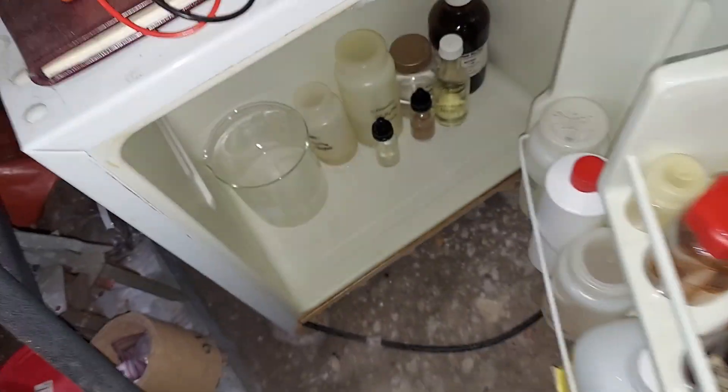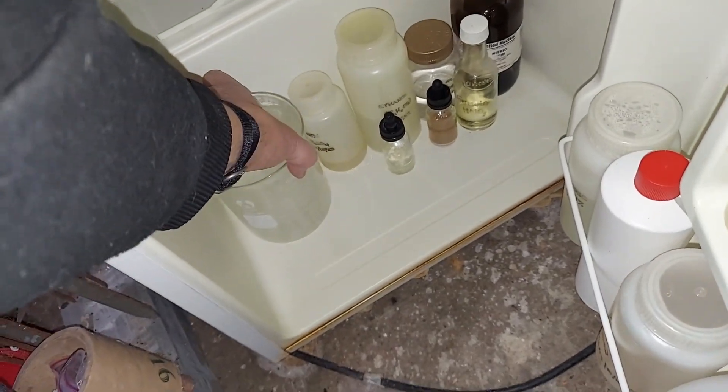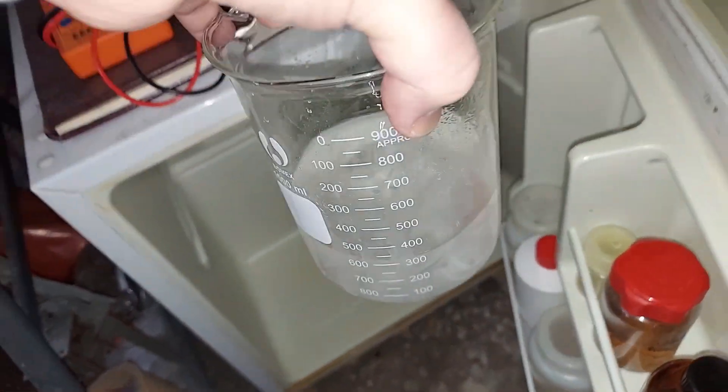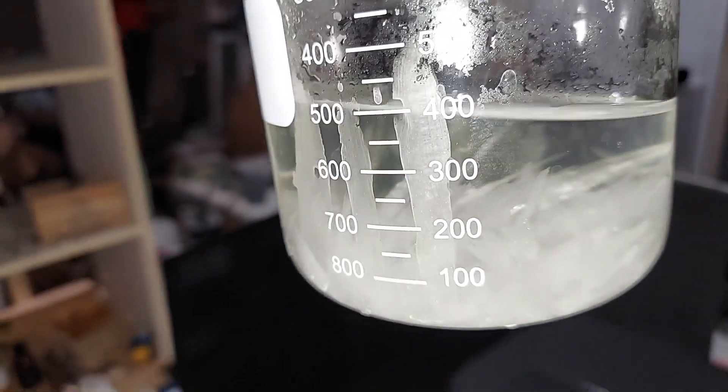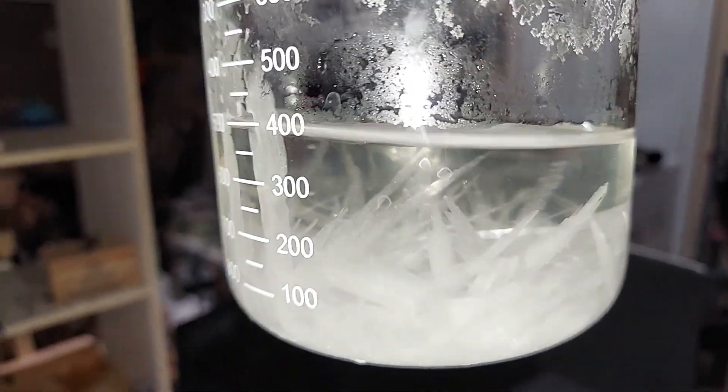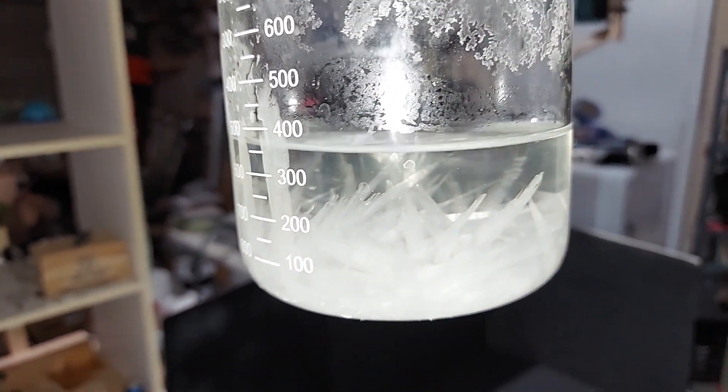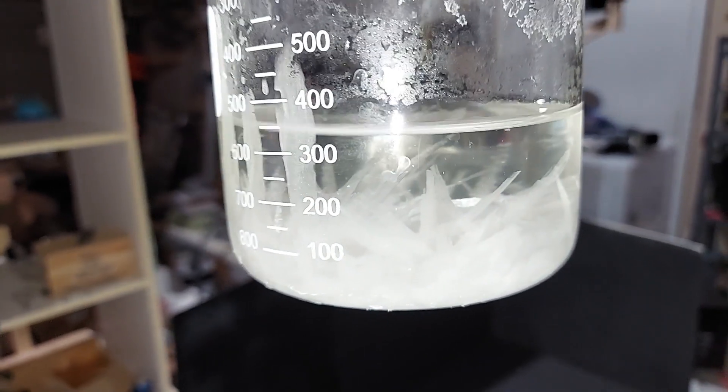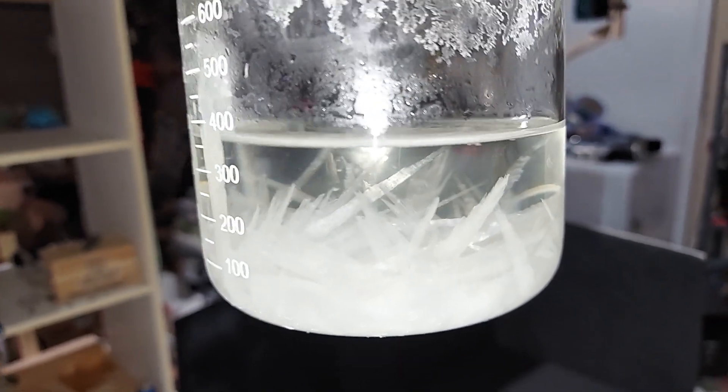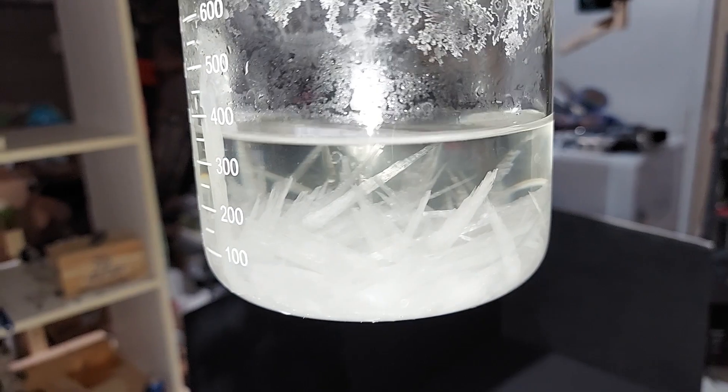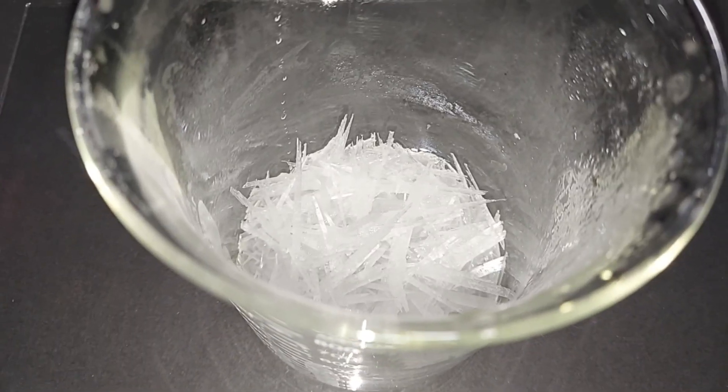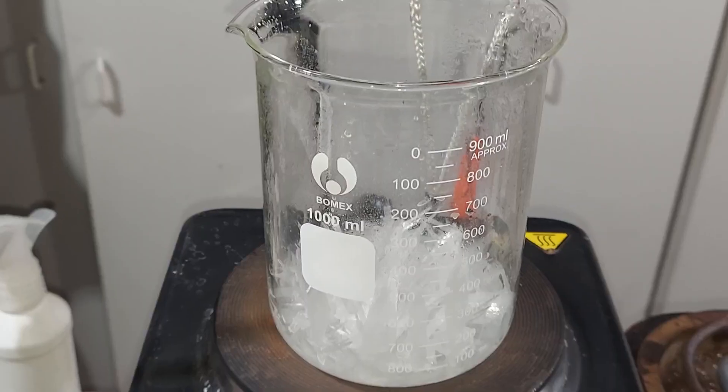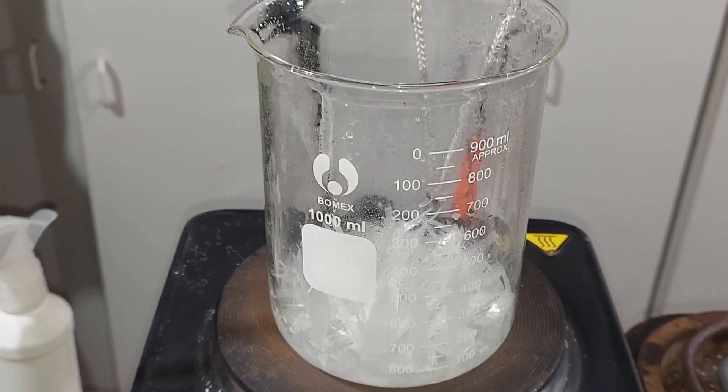It's been about an hour. It should be done. Let's take a look at this here. Look at those. Some really nice needle-like potassium nitrate crystals. So I think what I'm gonna do is decant this, see if the crystals stay in there. If they do I'm just gonna pour hot water in it and we'll recrystallize it one more time. I decanted this and not a single crystal moved.